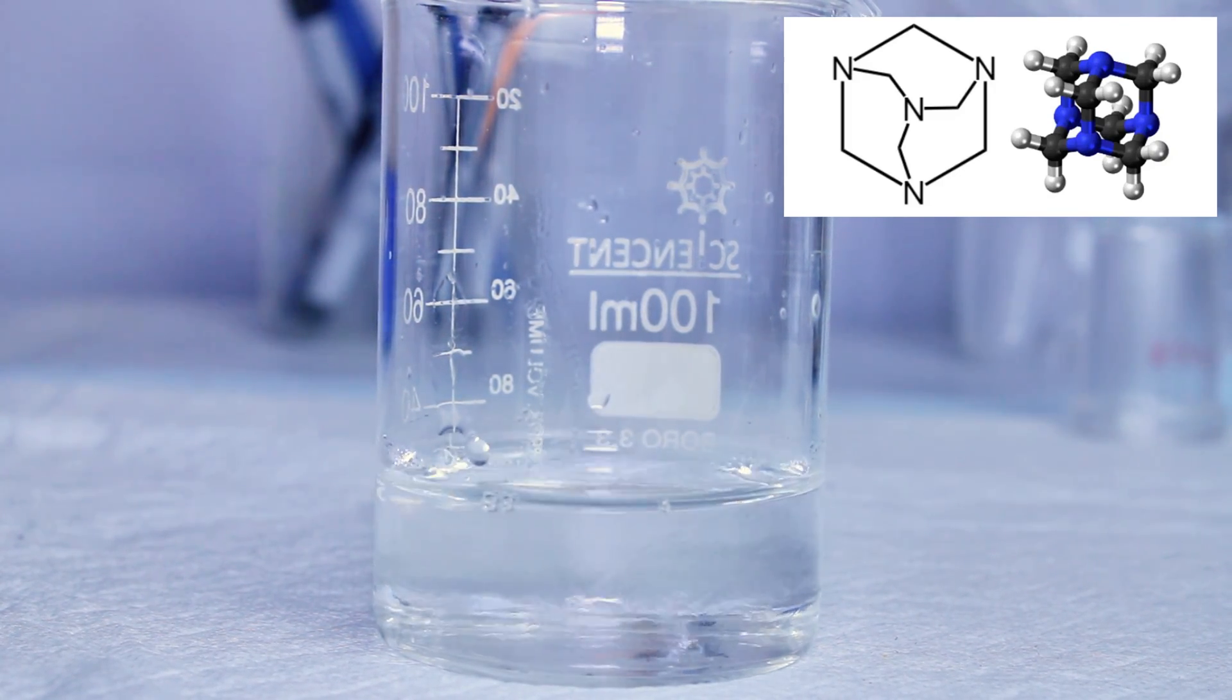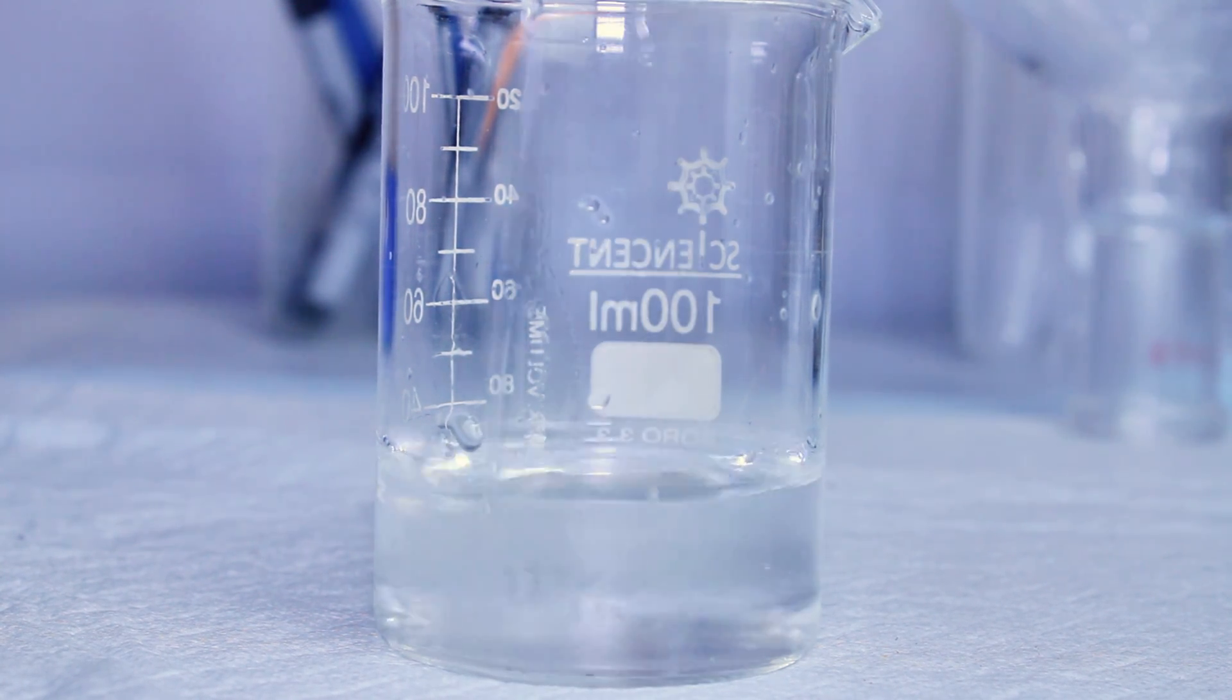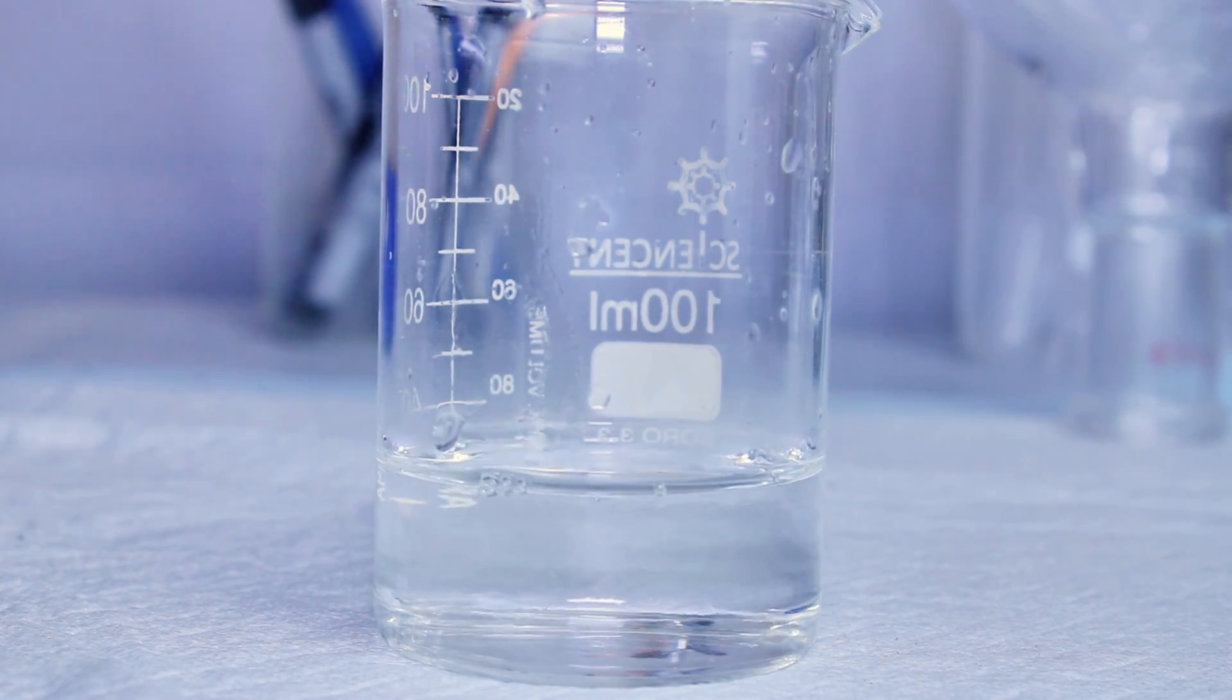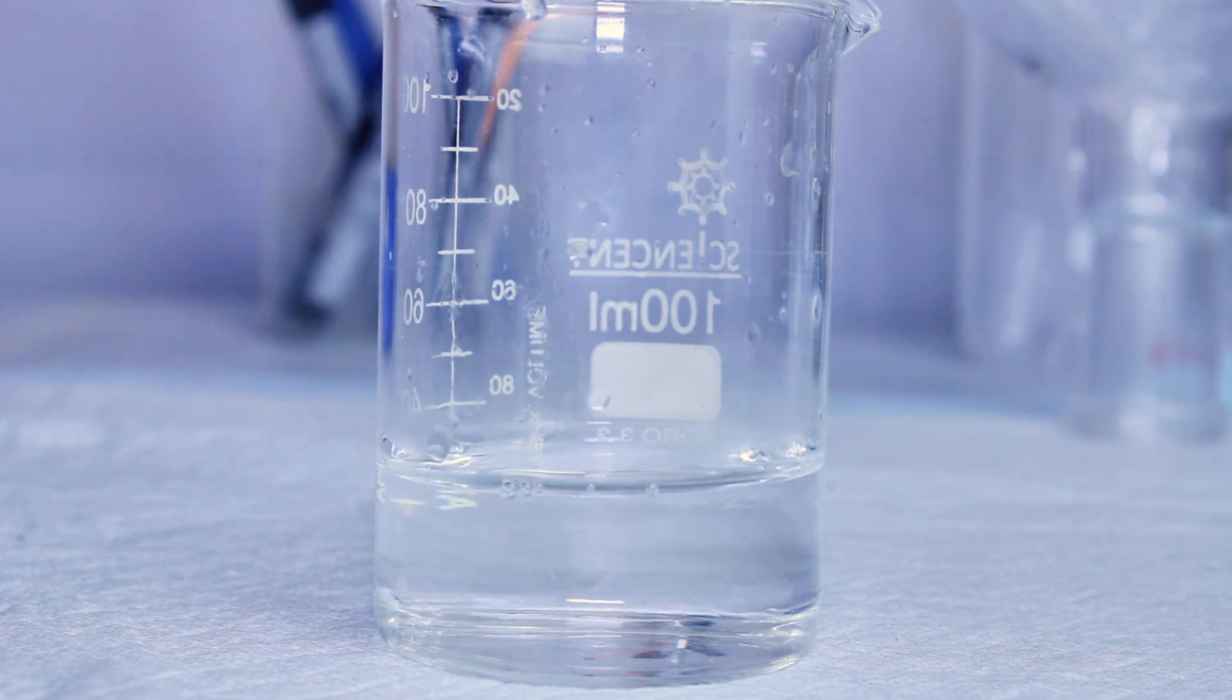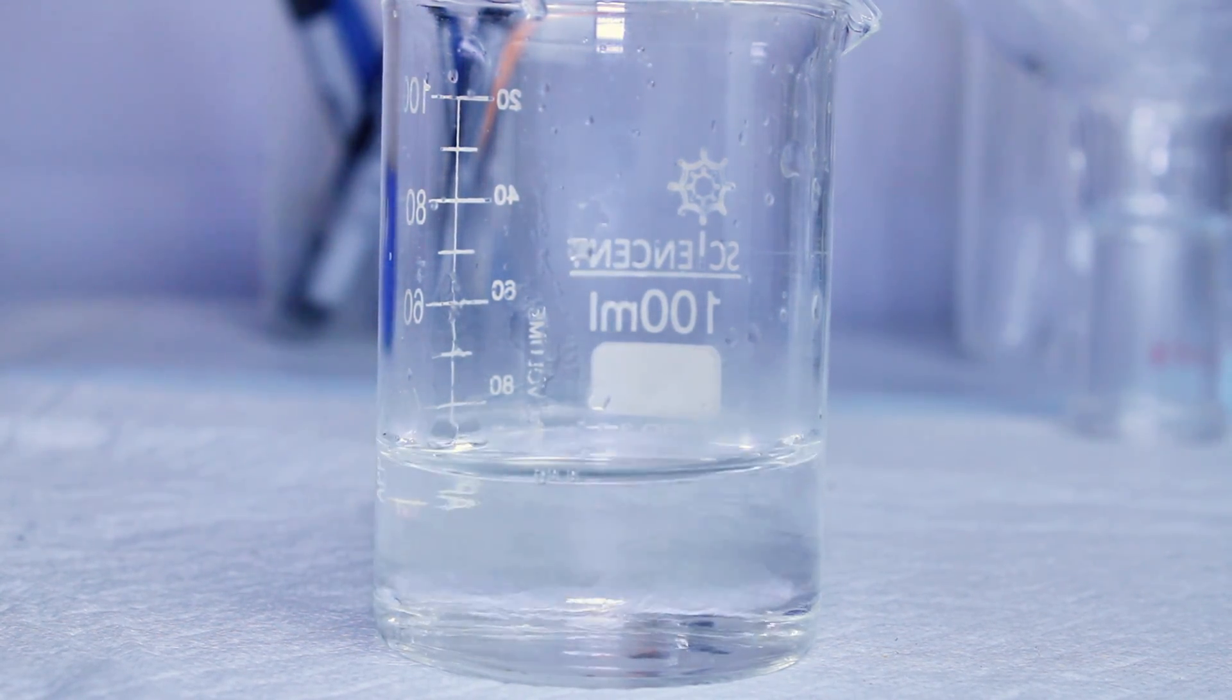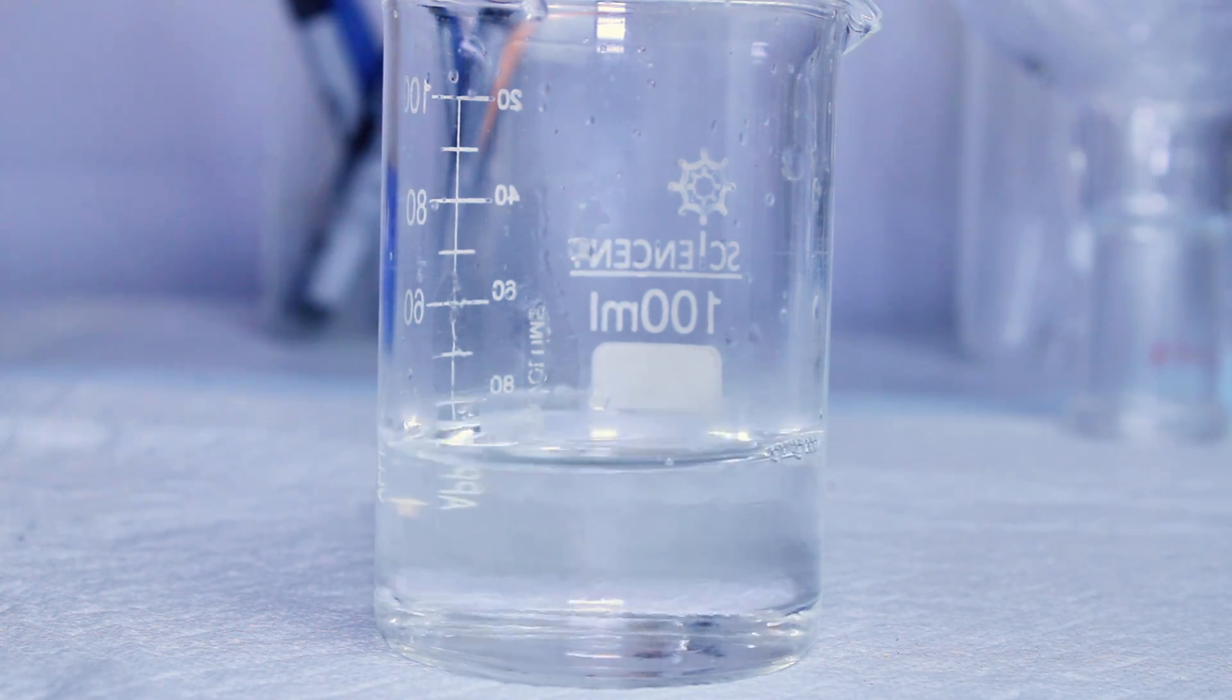Synthesizing hexamine yourself is actually pretty easy, and all you have to do is mix together ammonia and formaldehyde. In my case here, I used about 30ml of a 37% formaldehyde solution, and then added a large excess of ammonium hydroxide.